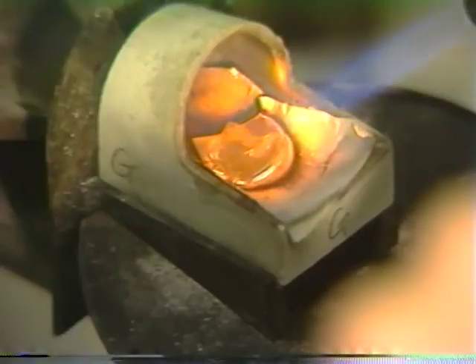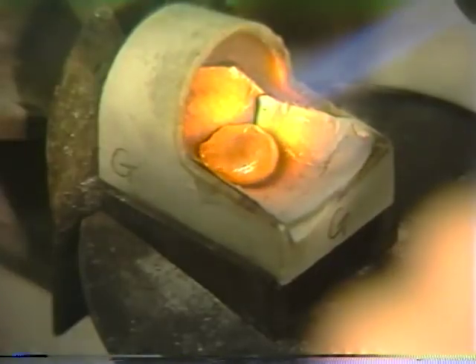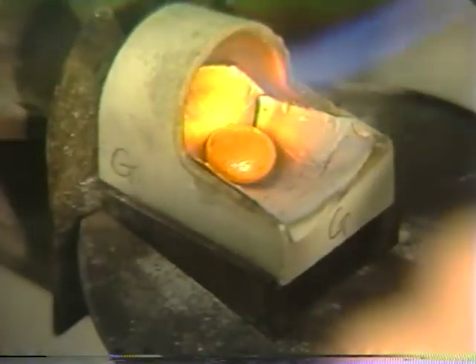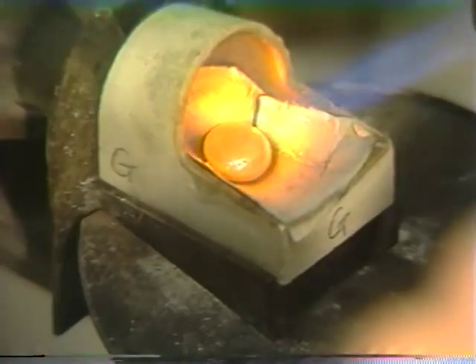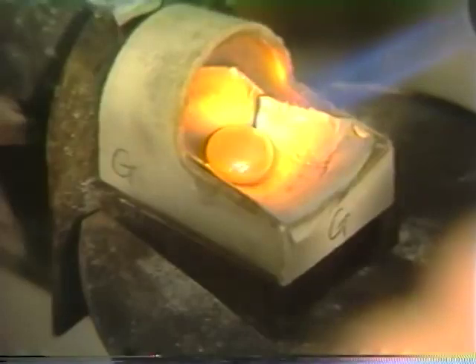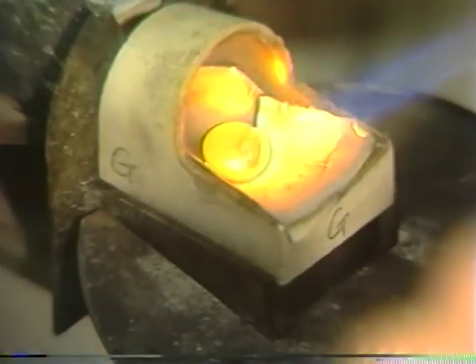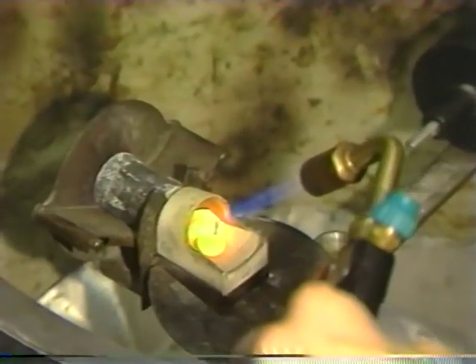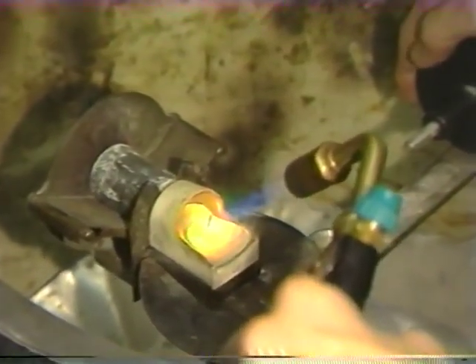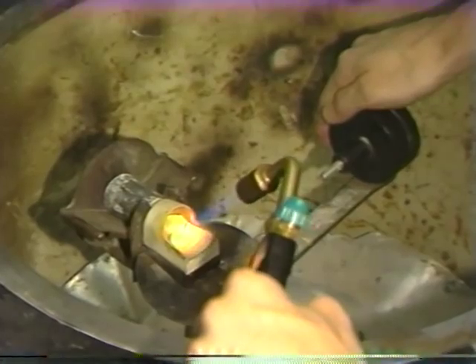At this time the melt is almost ready and the ring can be placed in the cradle. The tray is then slid into intimate contact with the ring. Make sure that this is contacting the ring. The pin is dropped but the machine is held in position, and then carefully and gently released to make the casting.